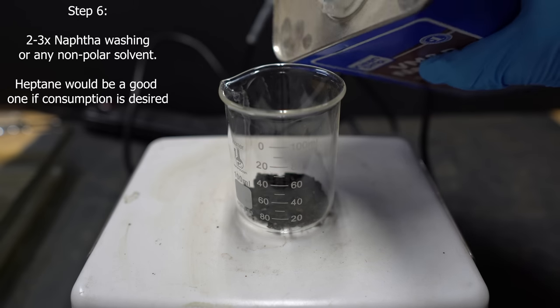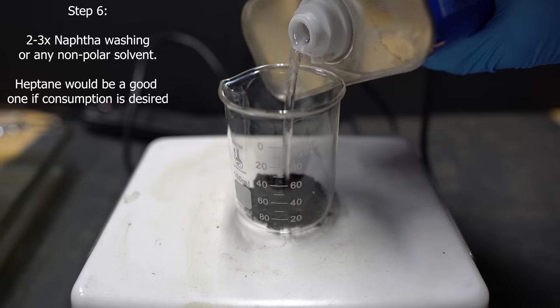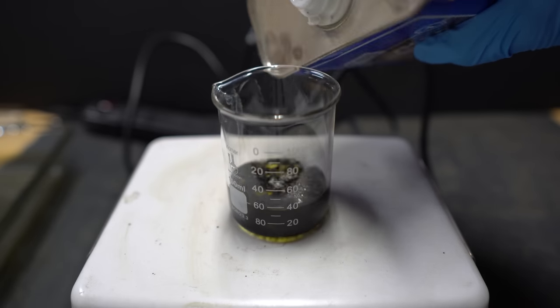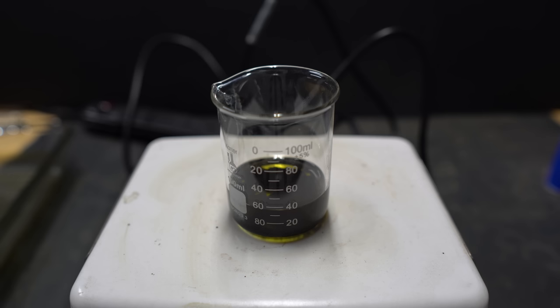This is okay though since we are going to do naphtha washings. Naphtha is the solvent of choice that I used, but really any non-polar solvent will work. I would recommend using heptane or something similar as that's definitely less toxic than naphtha if consumption is the desired goal.